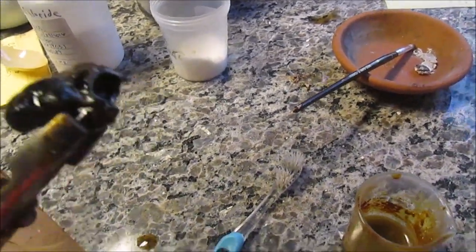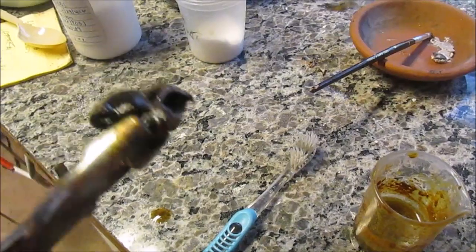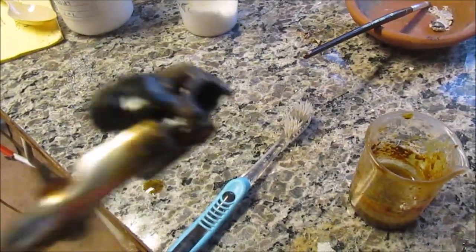Now, about four years later, we took that iron out of storage and converted it back to iron oxide with acid and oxidizer, and made thermite from it once again — like a phoenix rising from the ashes. Like a thermite phoenix. A phoenix thermite.